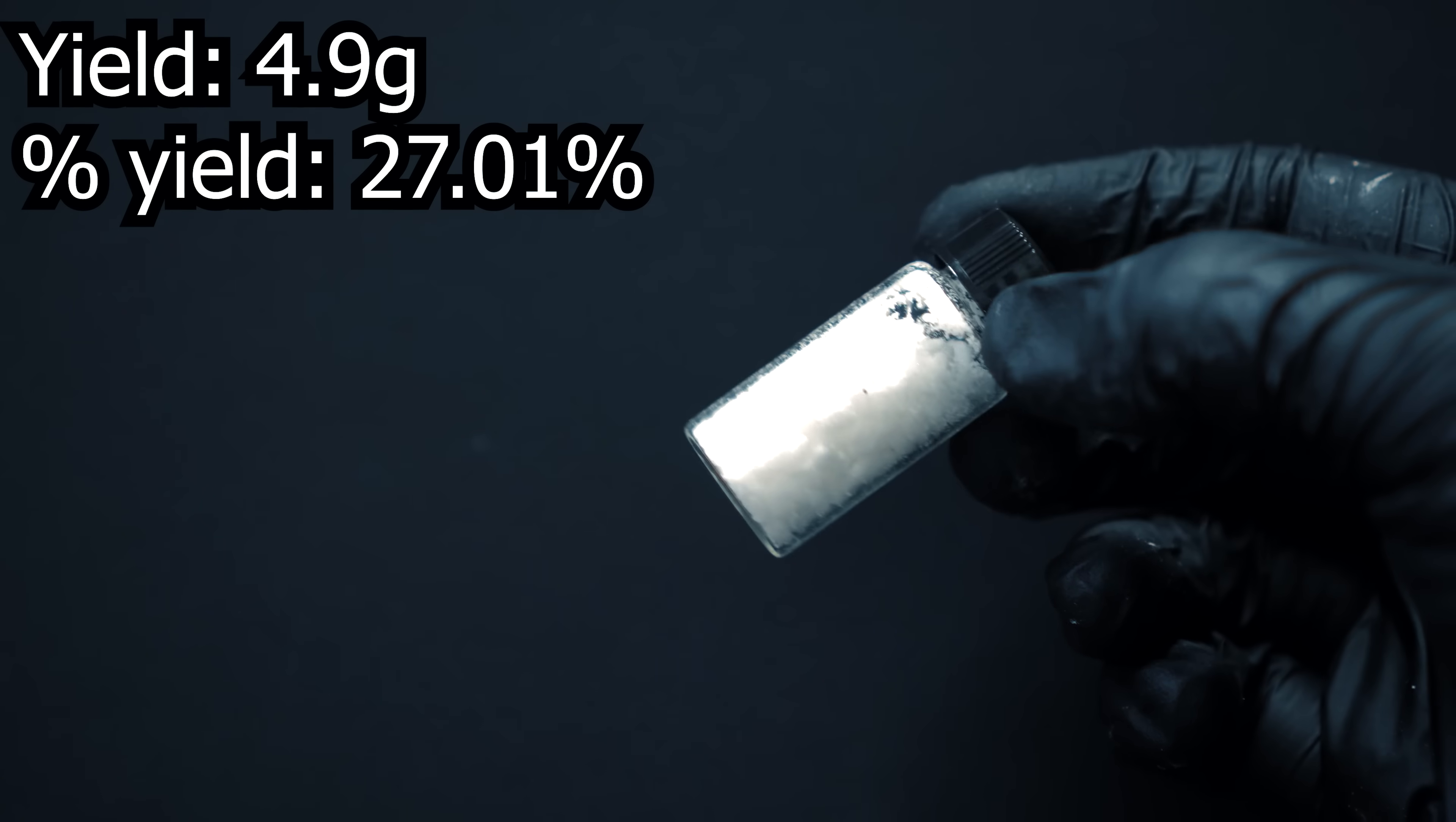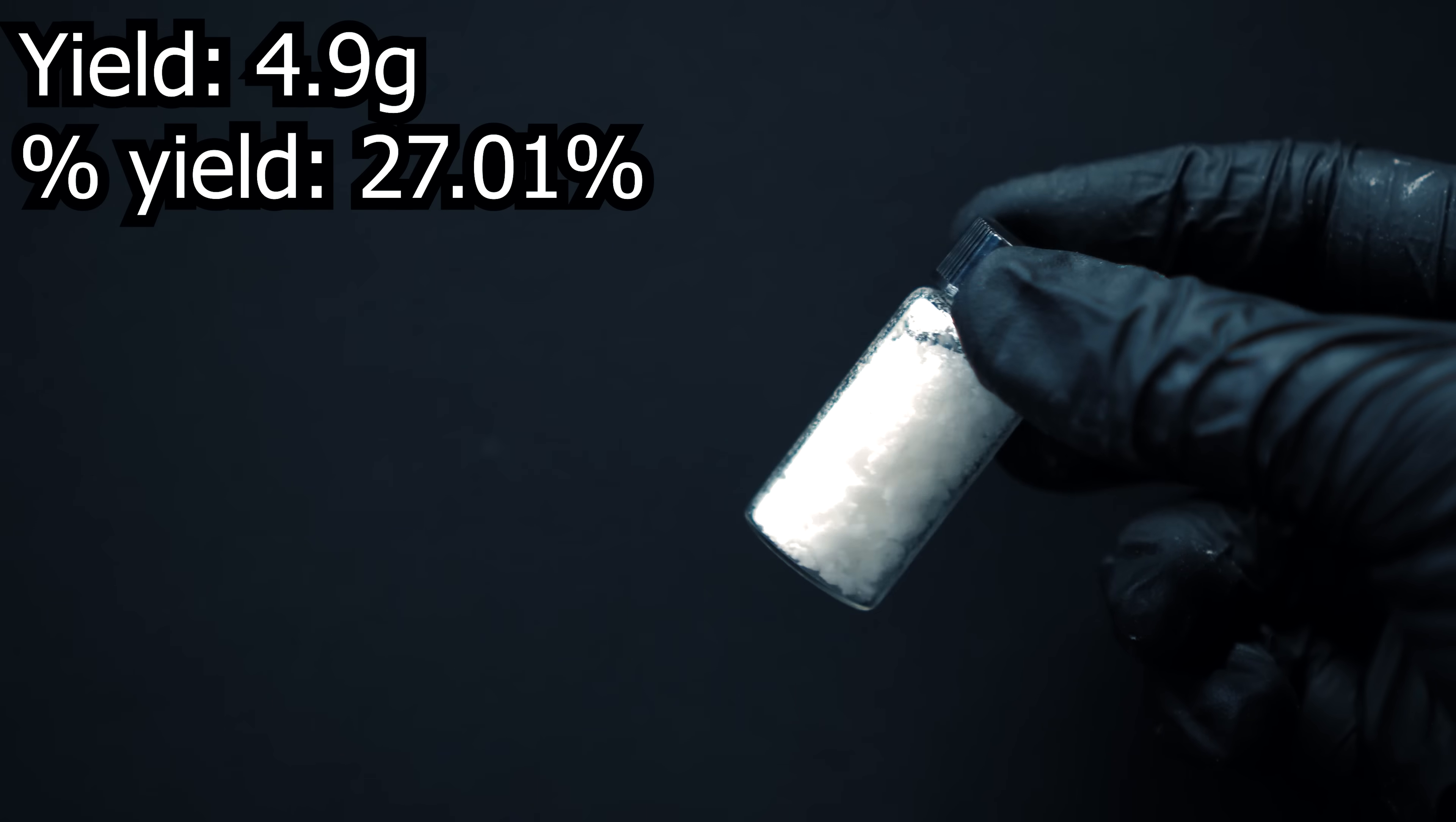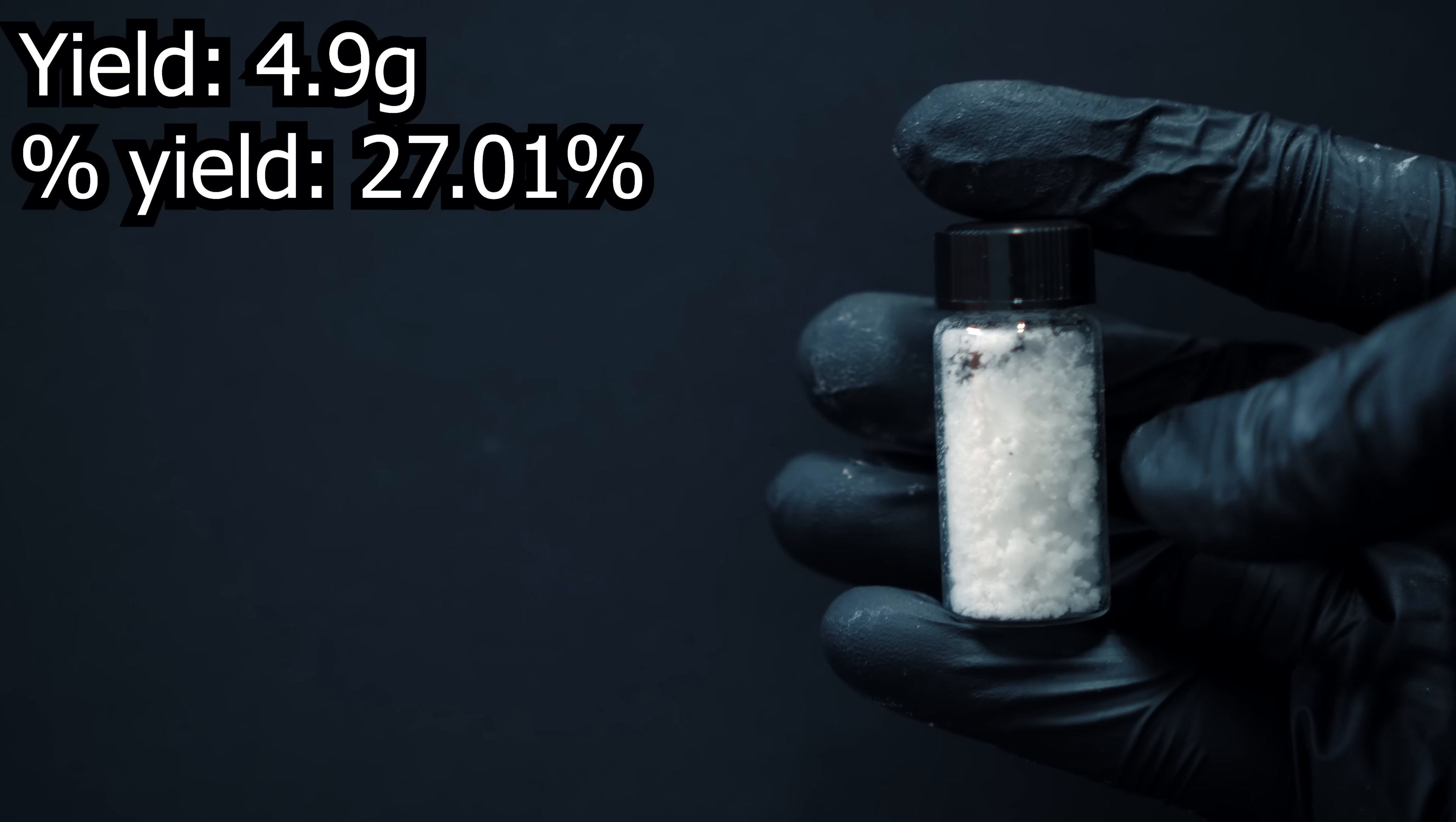I ended up with a yield of 4.9 grams and a percent yield of 27.01. I should have definitely got a higher yield and I'm not really sure where I went wrong.